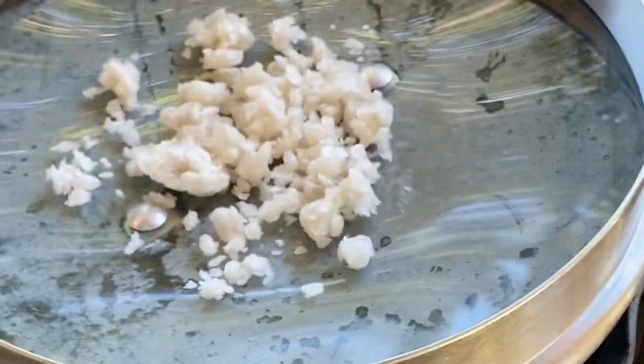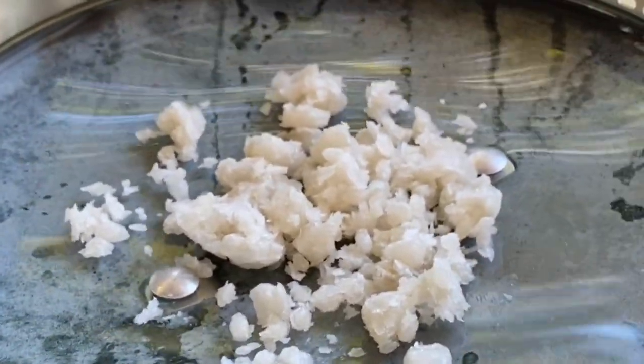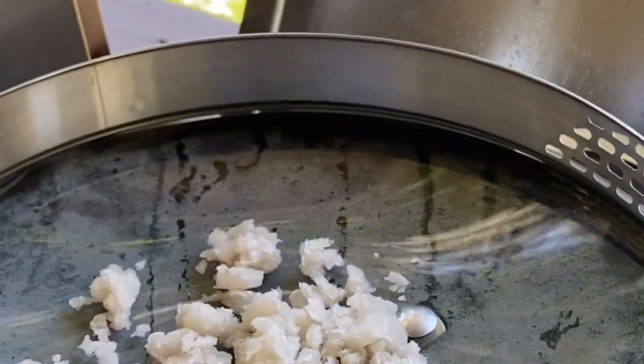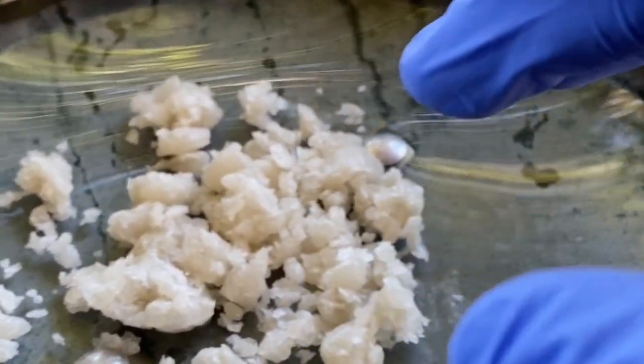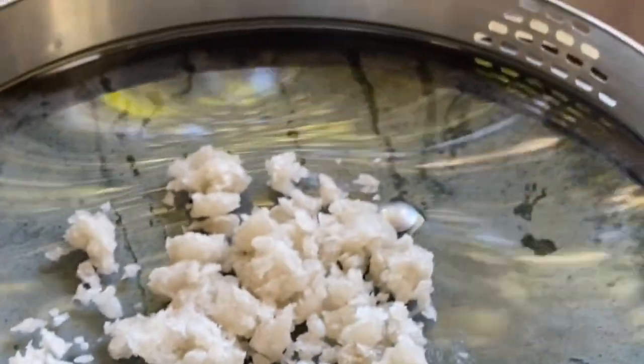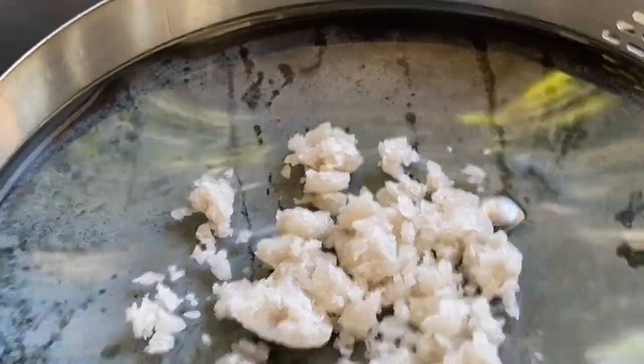Okay, so what I have set up here is a little double boiler. I've got a pot full of water and I'm boiling it, and then the steam will come and settle on this glass and heat it up, and that'll cause these crystals to melt, and any toluene that is left in here and any water will boil off. So once it starts to melt, I'll take another video.